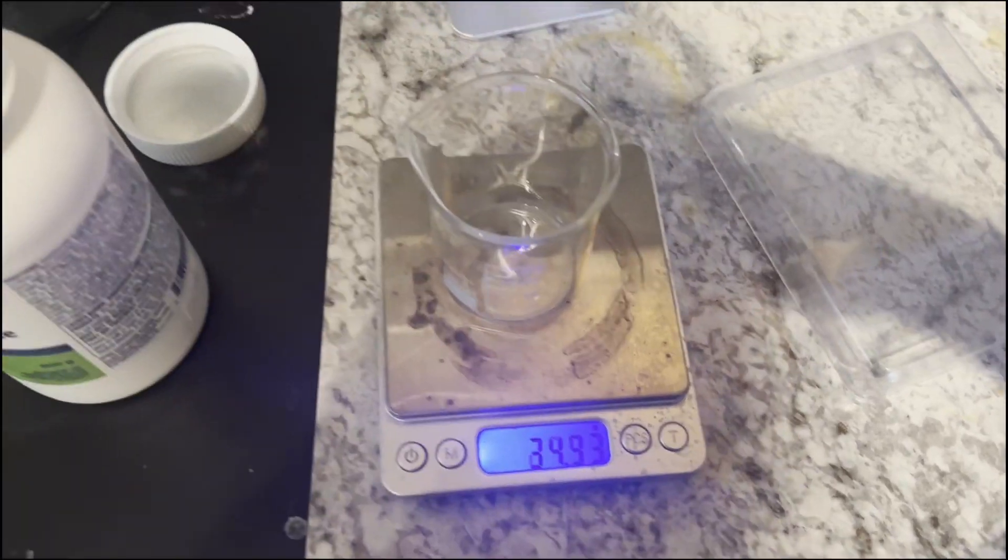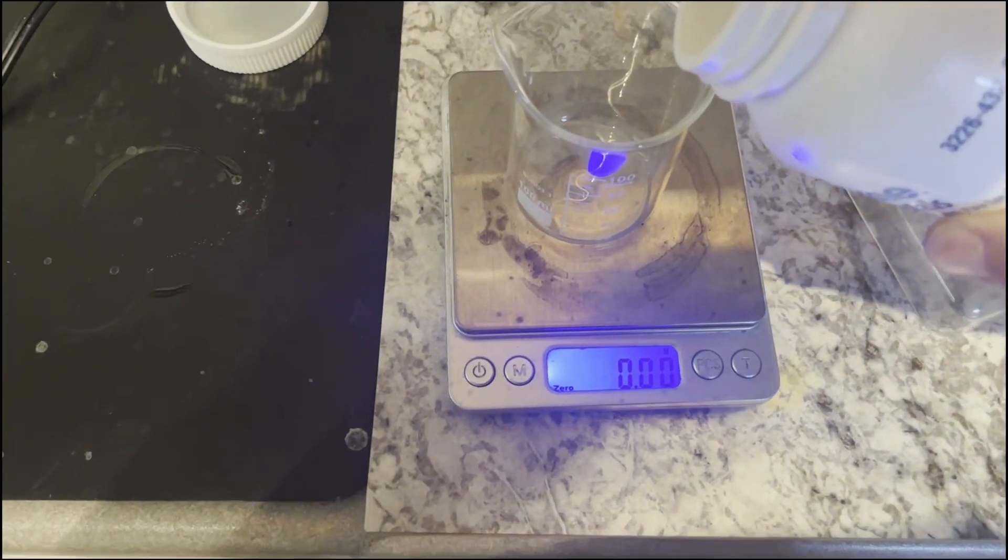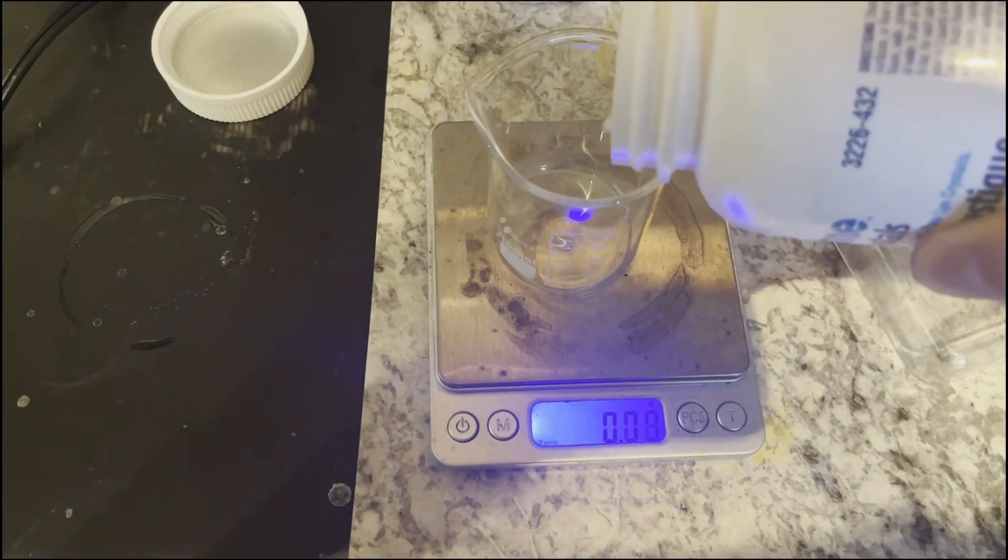The old beaker was put into a freezer and a new beaker was placed on a scale. 55 grams of sodium hydroxide was then weighed out and put off to the side.